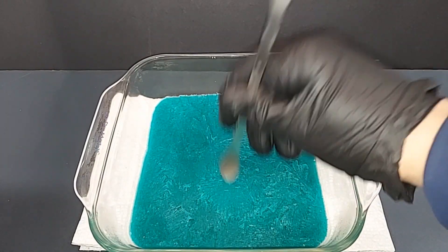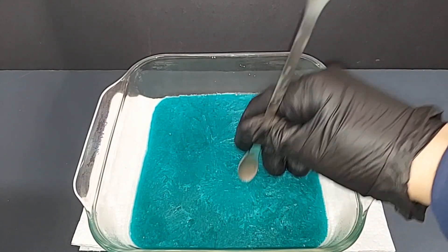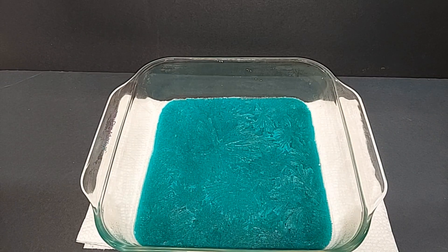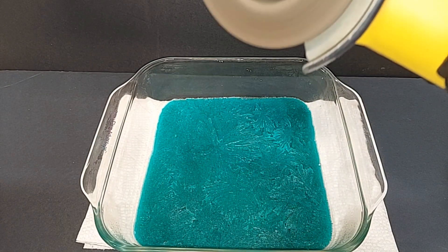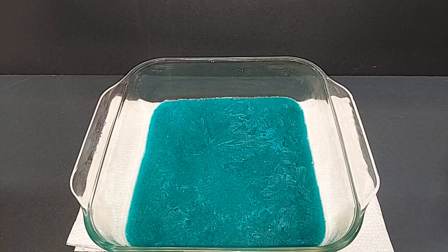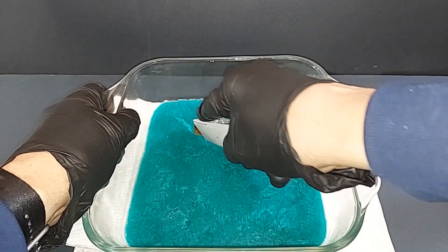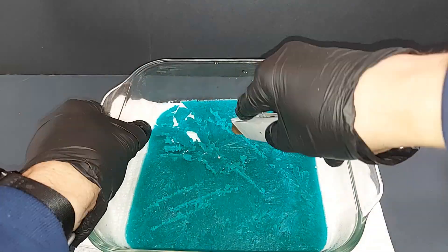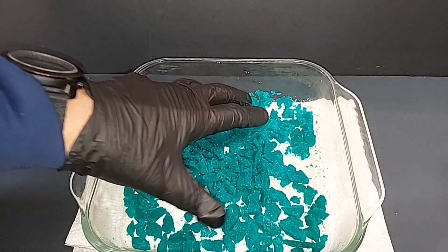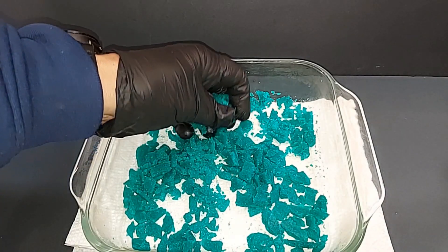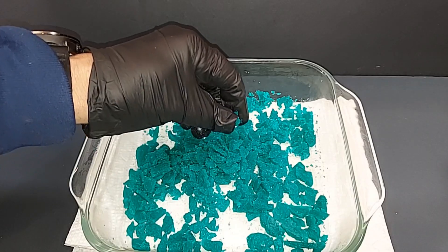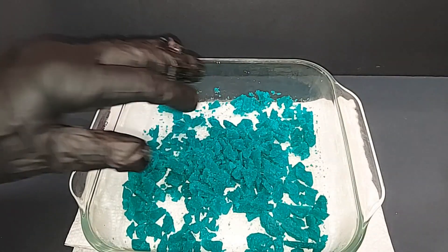Running this metal spoon across this is doing basically nothing. It is extremely hard, so I'm overkill, but maybe this will work. Yeah, oh that's tough. So I obviously broke these into some pretty small pieces here, but I'm going to continue to do that and break it into even smaller pieces, and then we will wash them, dry them, and weigh them.